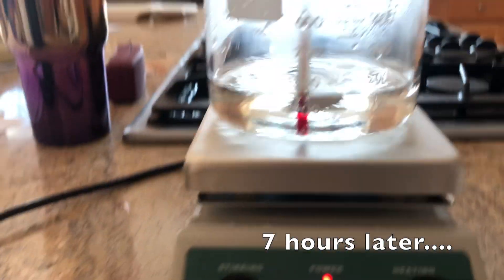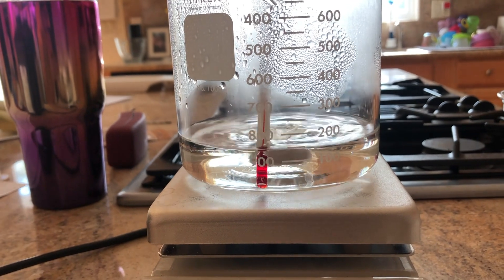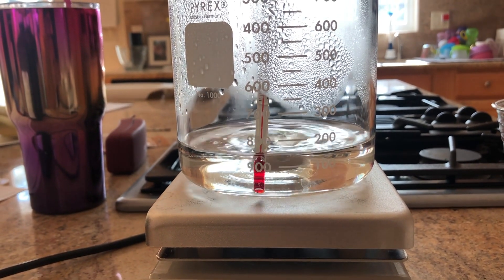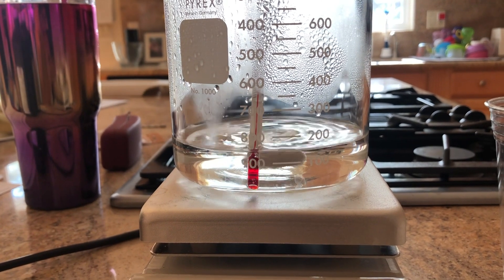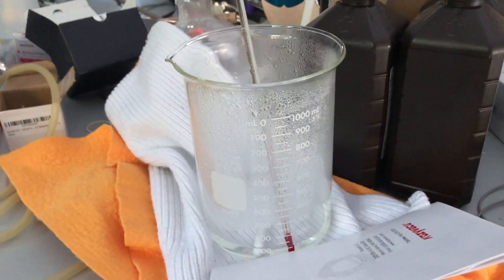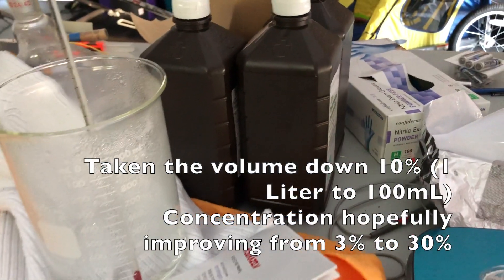Almost there. Let's stop it before we get to about 120 milliliters and then when it cools down it'll shrink a little bit more. Okay, so we've taken the peroxide down to about 10% so we're hoping it's about 30%.